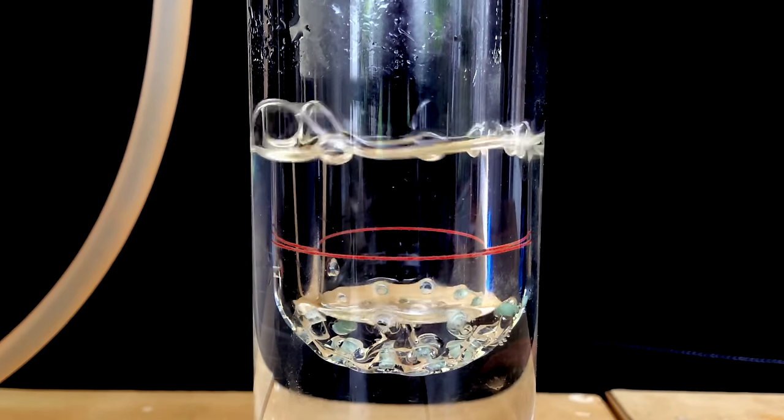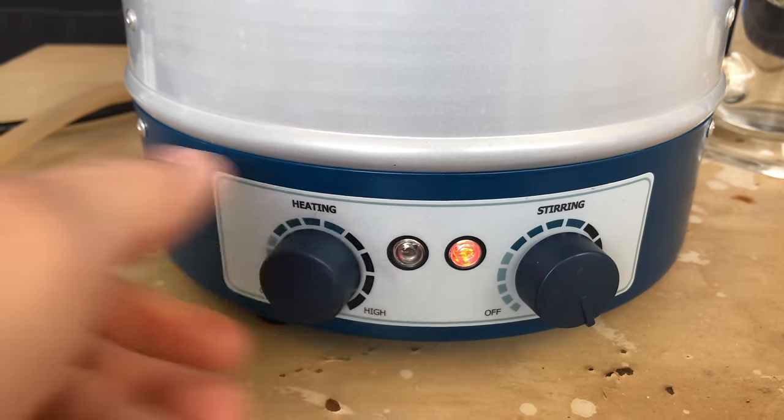By the way, if you happen to know anything about this reaction, please let me know. I can't rest peacefully otherwise. Three hours in, the gas evolution stopped. I turned off the heating and let it cool down.